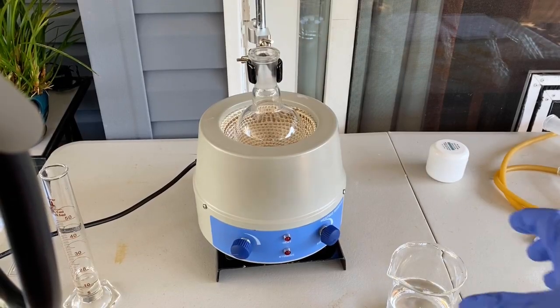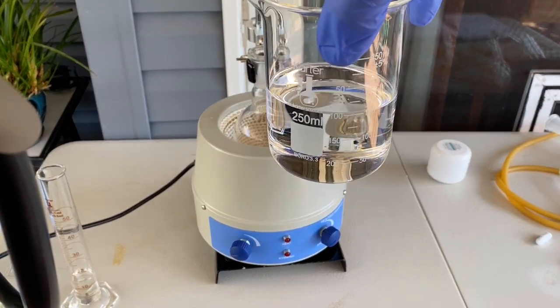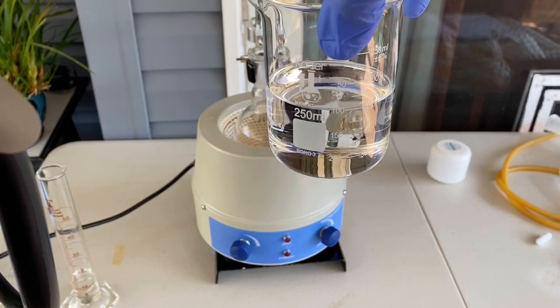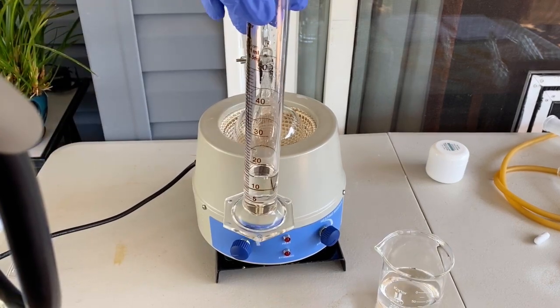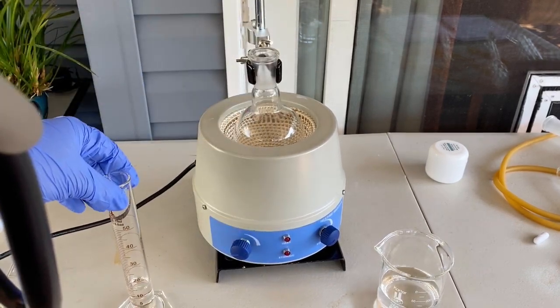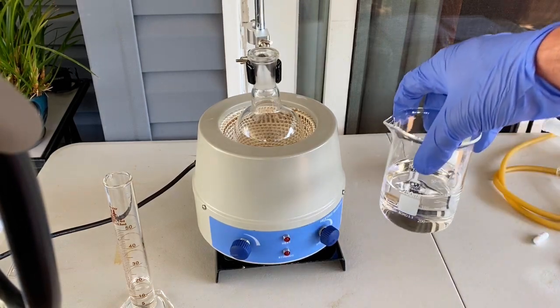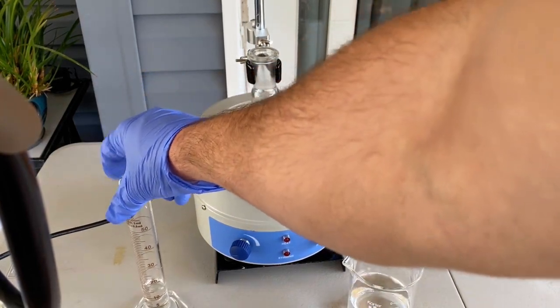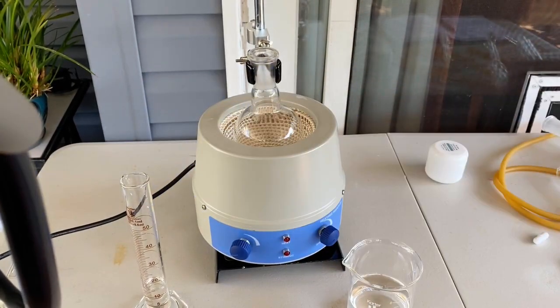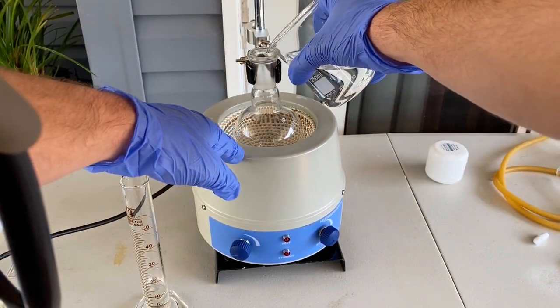Hello everyone. Alright, so just showing you real quick the ingredients we need. About 150 milliliters of the toluene we purified in the last video, and about 15 milliliters of sulfuric acid. I'm using drain cleaner again, and we're going to be doing it in a 1-to-10 ratio. Whatever we have of this, we're going to take 10% sulfuric acid. So 150 milliliters, 15 milliliters. And now I'm going to put them both into here.